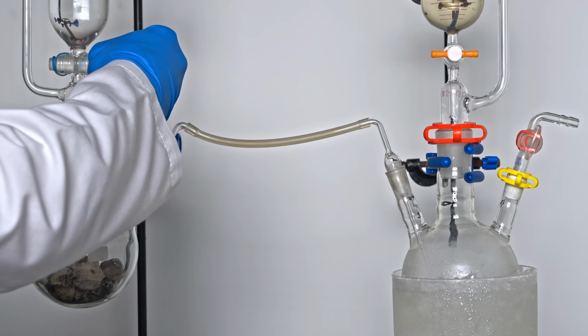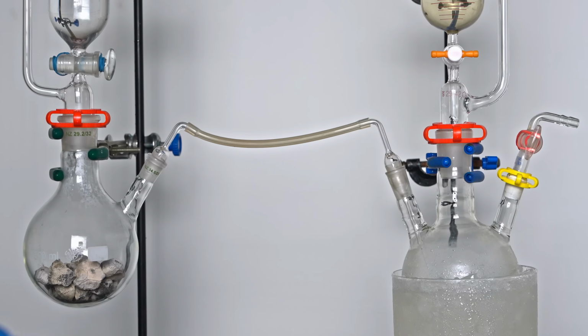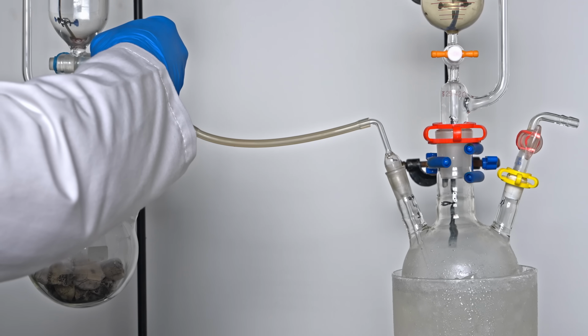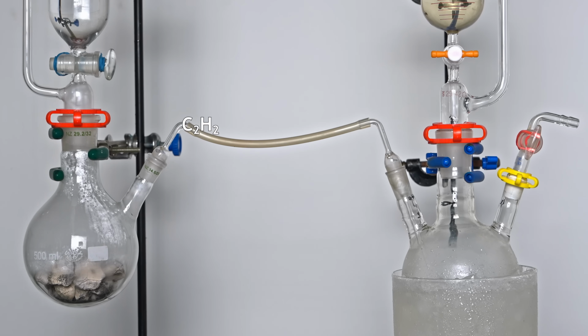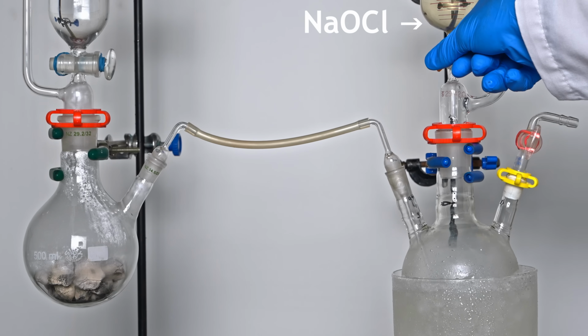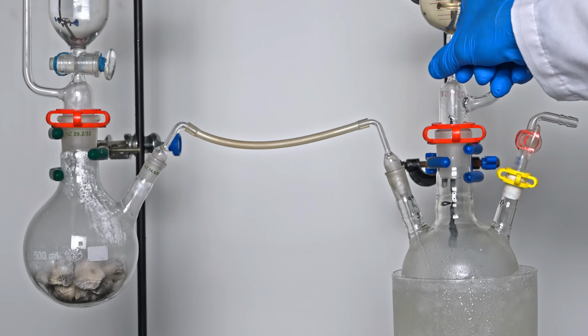Next, I'll start cooling the flask containing the potassium iodide and begin adding water to the calcium carbide dropwise to generate the acetylene. As the gas begins to bubble through the potassium iodide solution, I'll start adding the previously prepared sodium hypochlorite solution dropwise. As soon as the two solutions mix, the mixture in the flask turns yellow due to the formation of excess elemental iodine.